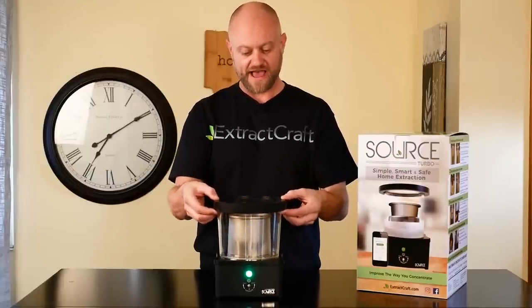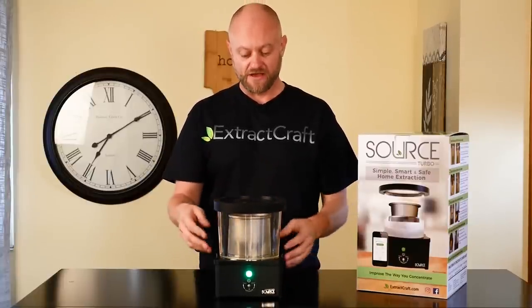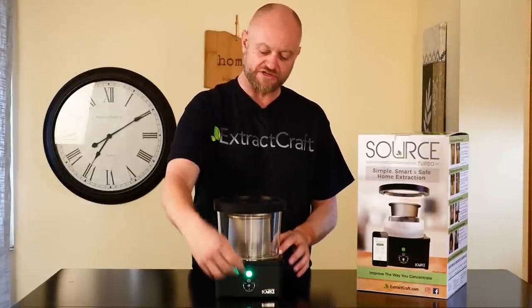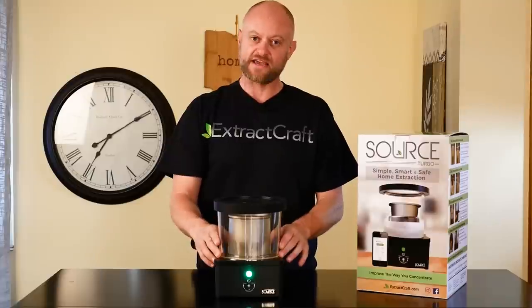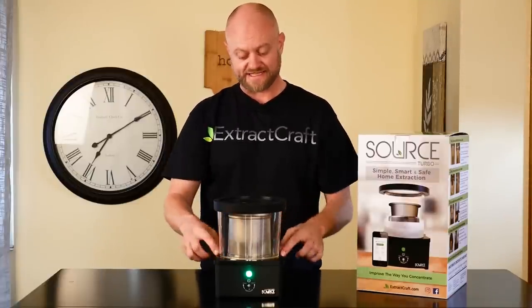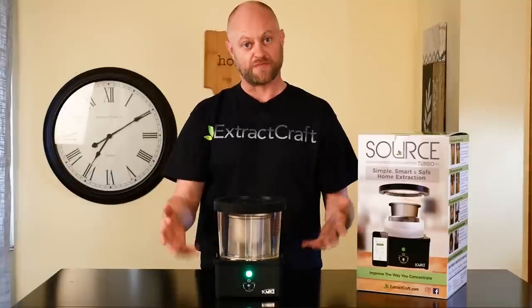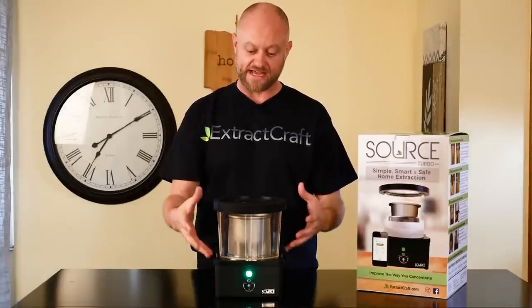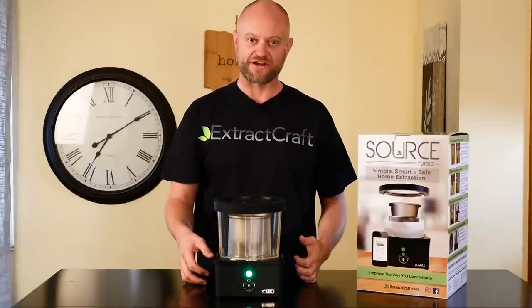The pumps will suck down the lid, and it takes about a minute to reach full vacuum. You should easily be able to pick the machine up after just a short time. If you can't, you need to either apply a little pressure, make sure your vacuum screw is tight, or make sure your globe is centered on the rubber mat correctly. This will take about a minute to suck down and then we'll be ready for the evaporation process.